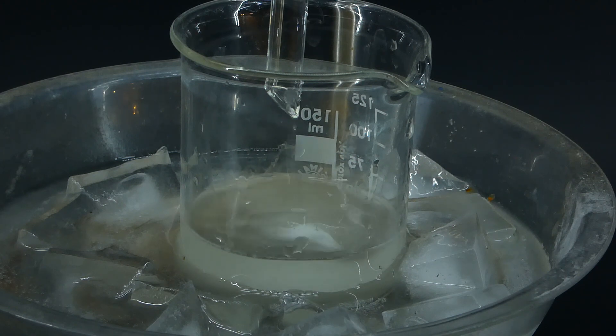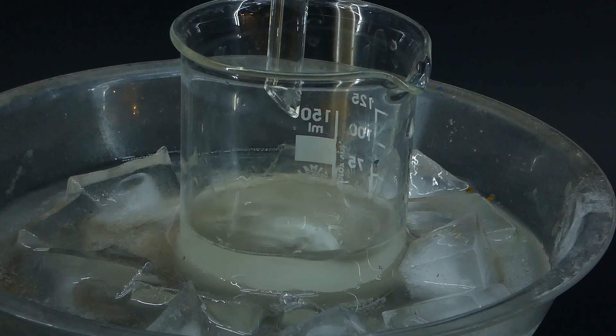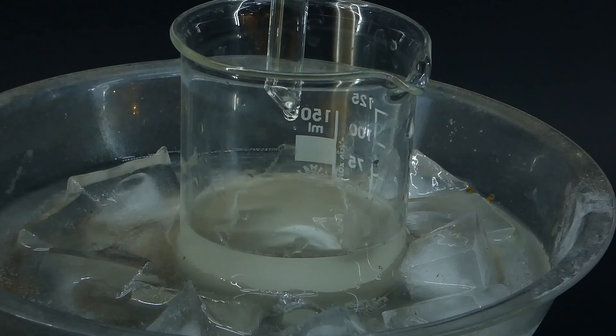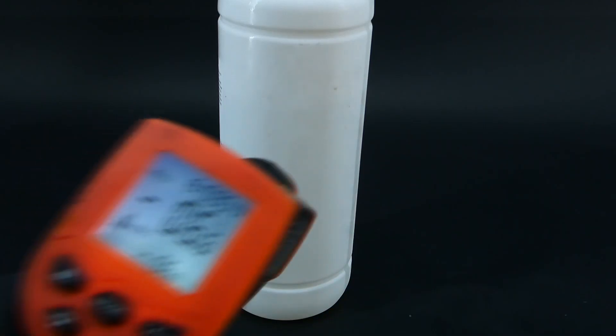The reaction of making isopropyl nitrite is very exothermic, which means that it releases a lot of heat, which in turn completely destroys your end product. I learned it the hard way, so to avoid making this mistake again, I put the hydrochloric acid and isopropanol in the freezer and chill them to about negative 6 degrees Celsius. When they were cold, it was time to measure them out.